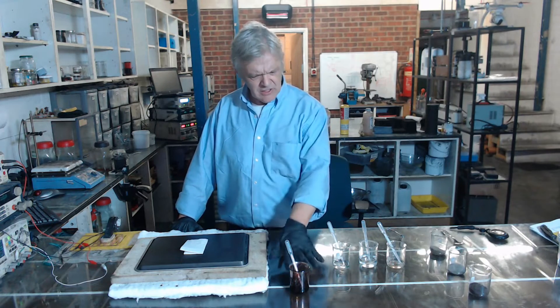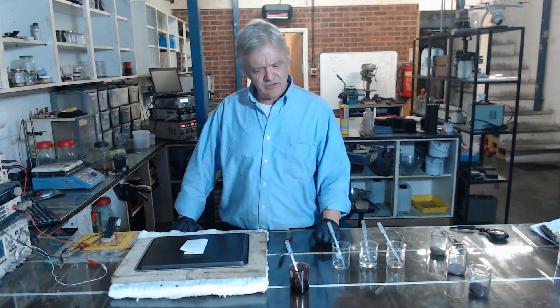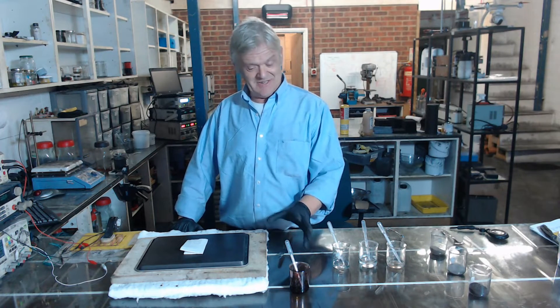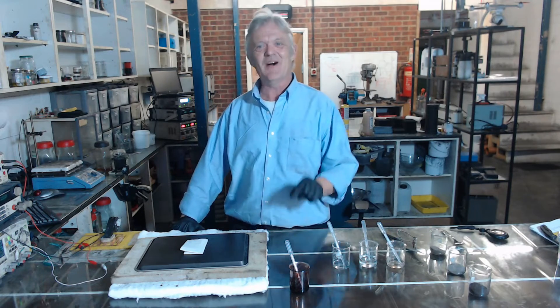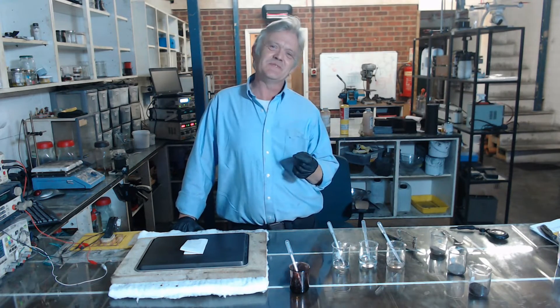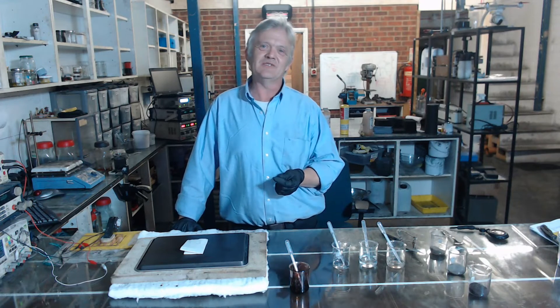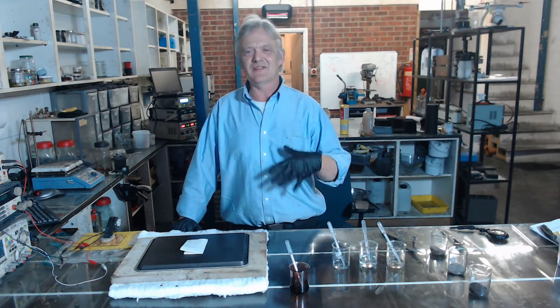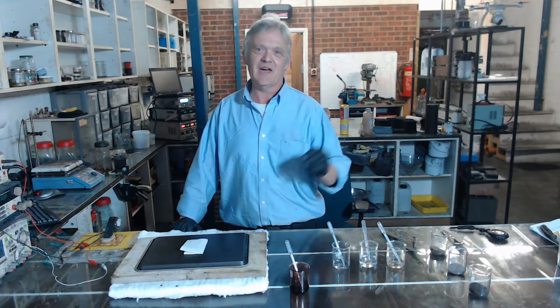What I've got here is a mixture of potassium permanganate and sulfuric acid. That is really unstable, so you don't want to go making that up. Health and safety — this is for demonstration and educational purposes only, so please don't repeat it at home. If you're going to repeat it and you're a qualified chemist, please do remember to wear all your safety gear.